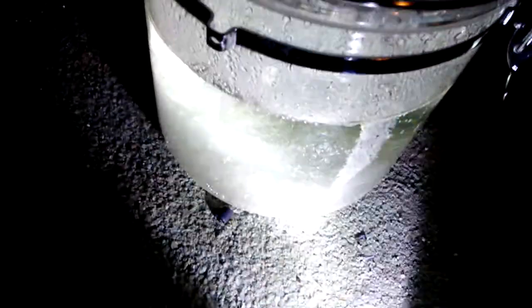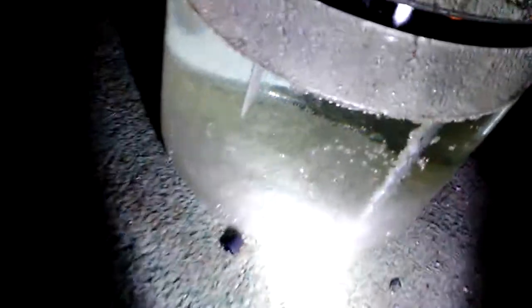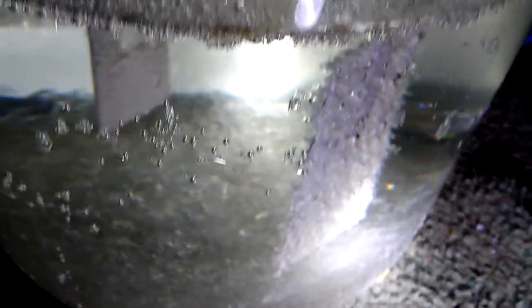Right now I got some potassium chlorate going in there. If you can see those crystals, they are big, beautiful plate crystals. I'm running about 2.6 volts at 20 amps, making some really beautiful plate crystals, and it's cold to the touch — not hot at all. I've only been running it for about a day and a half, and I got a pretty fair crop growing already.